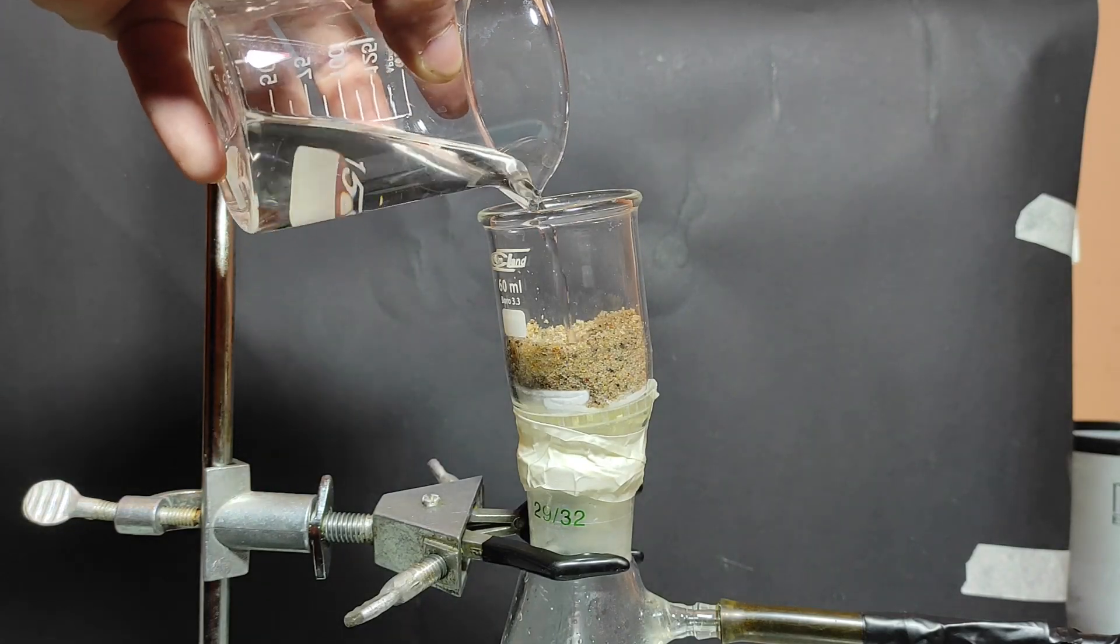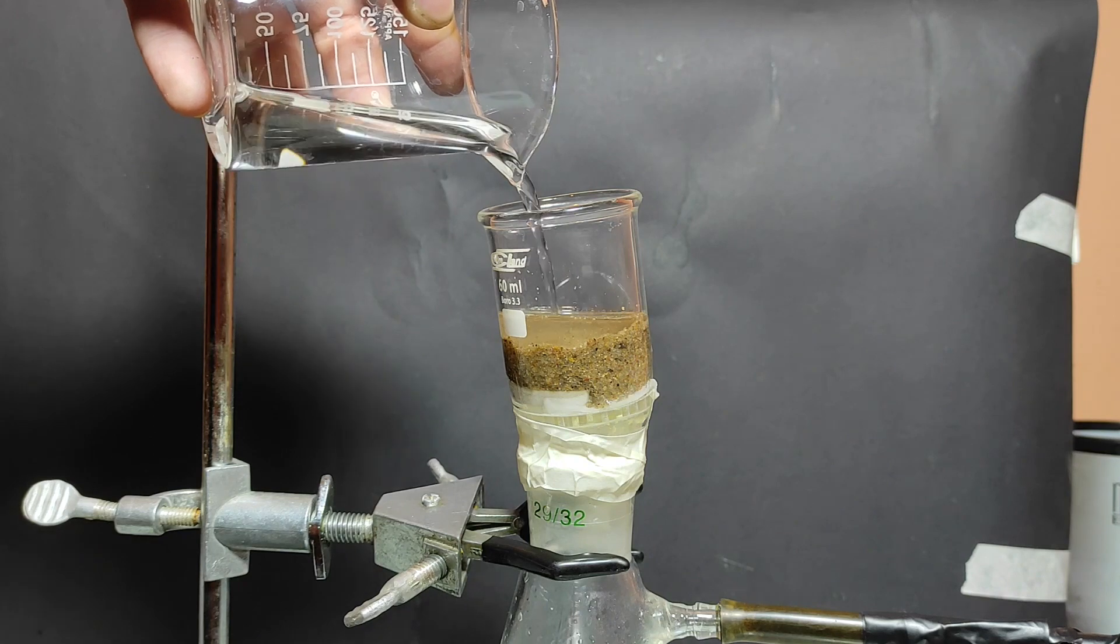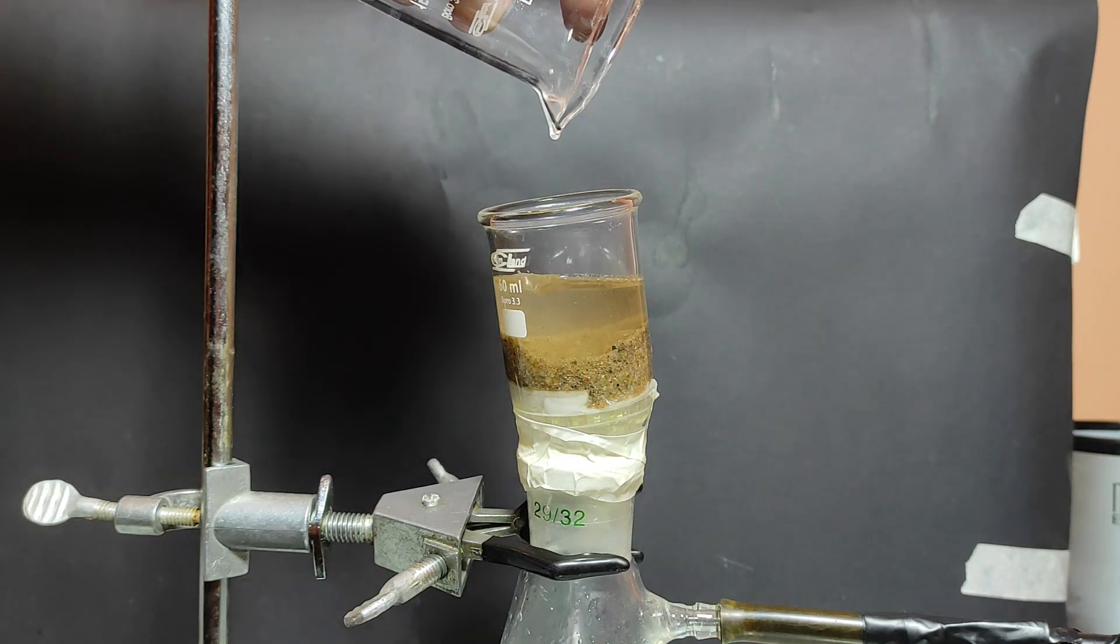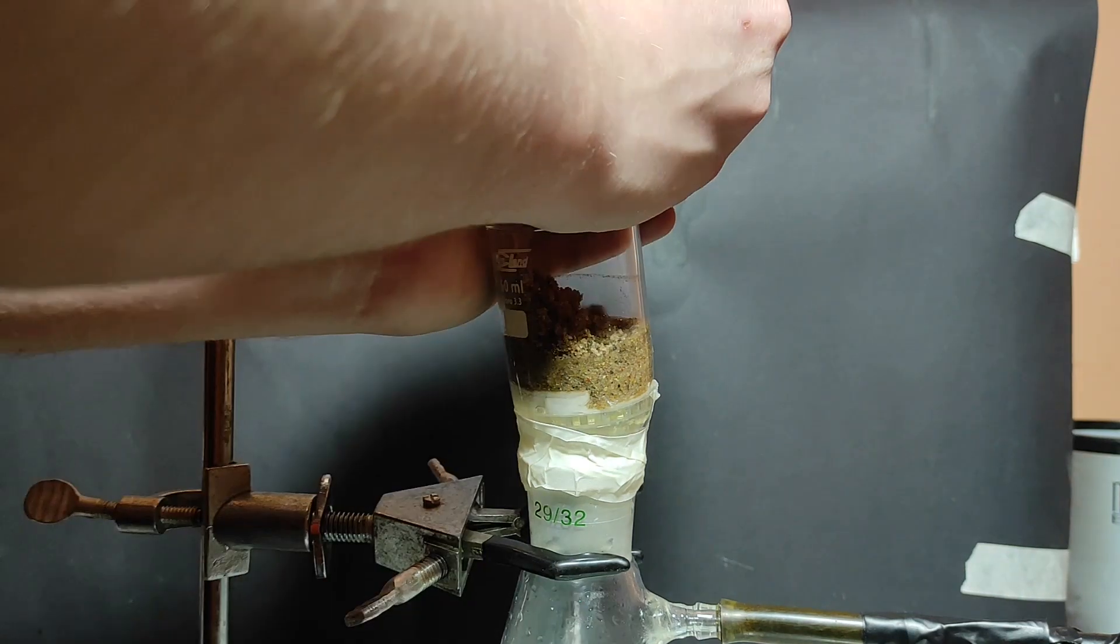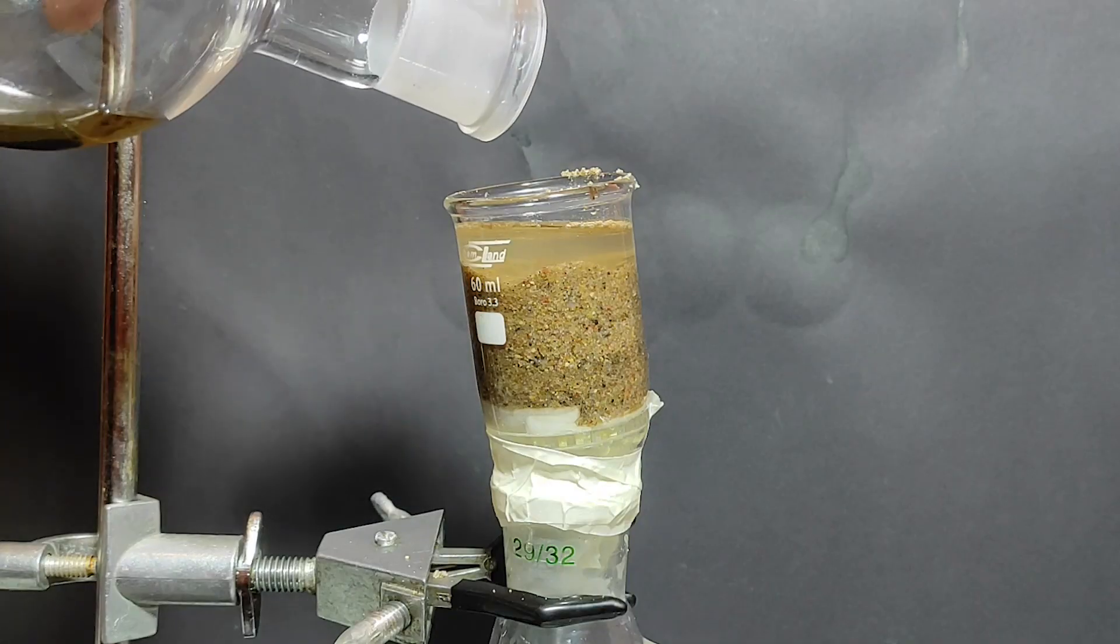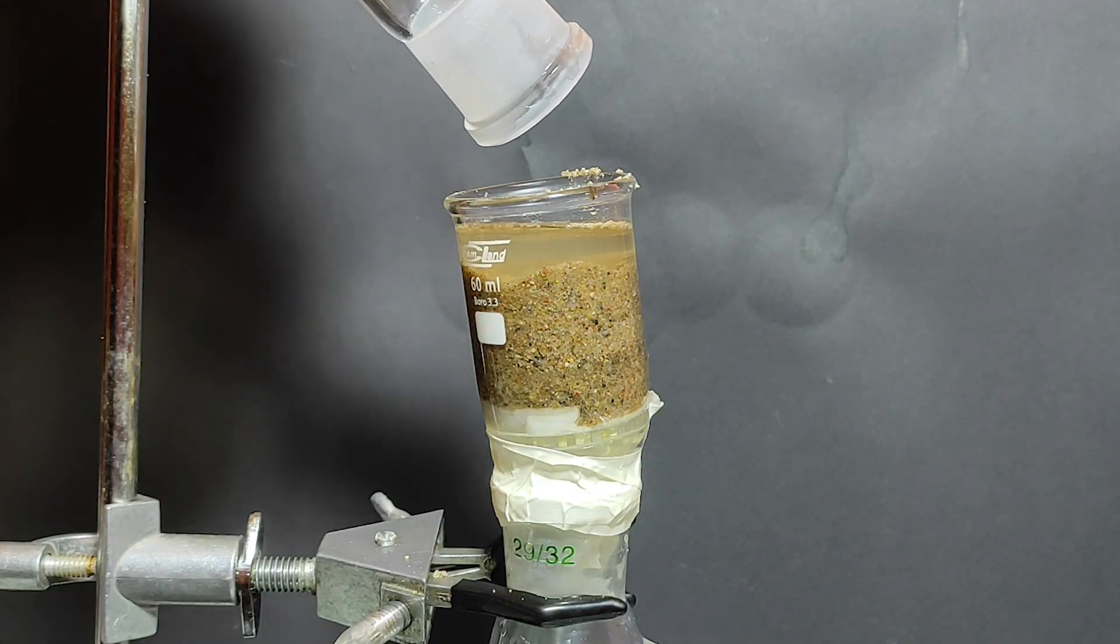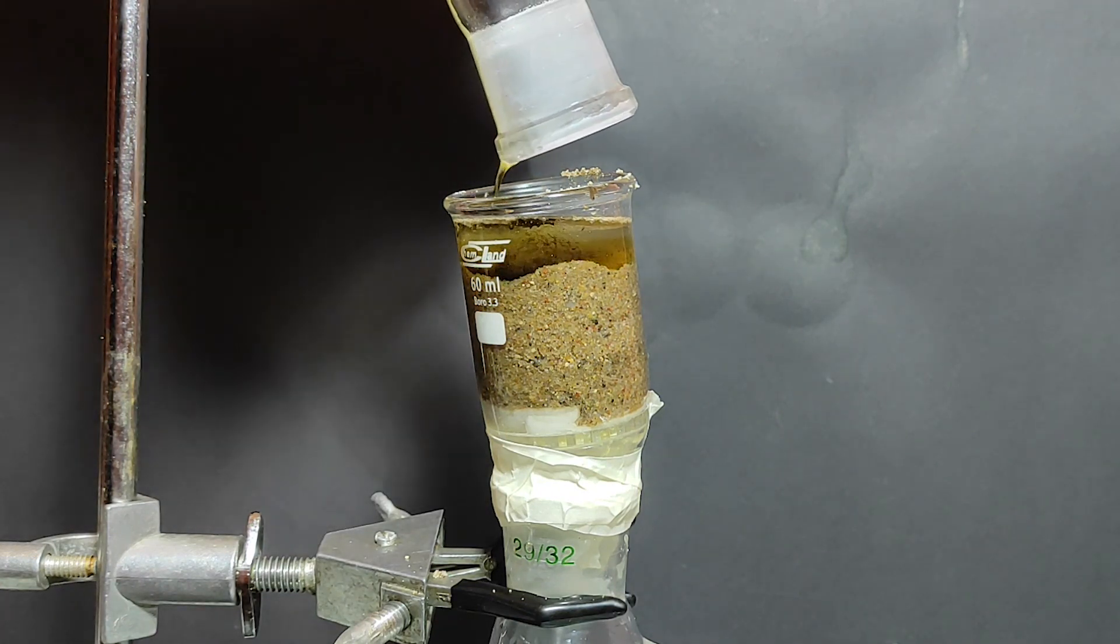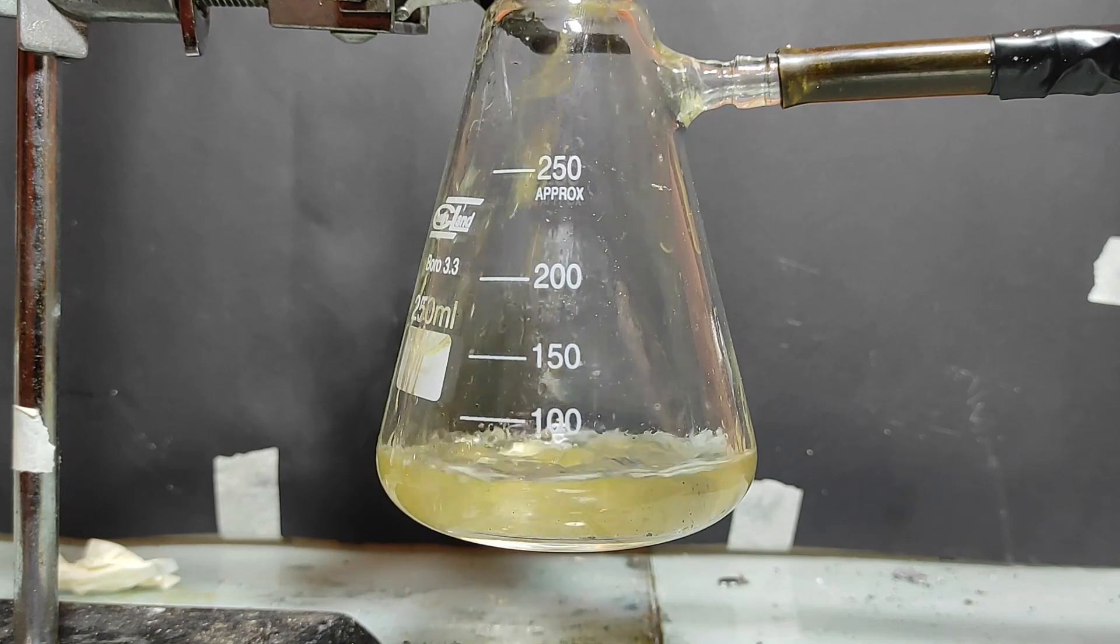So to try this in practice I've added the buffer solution. However, it was dripping way too fast, so I've had to improvise. Okay, here we go. After the filtration was started the vacuum was turned on.